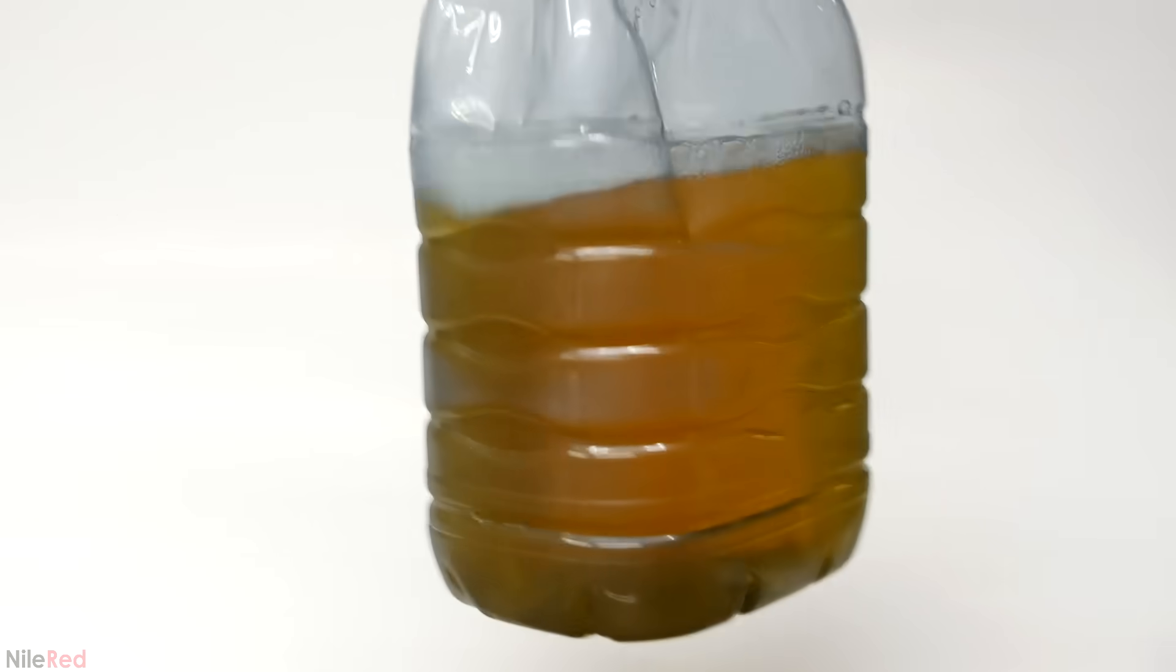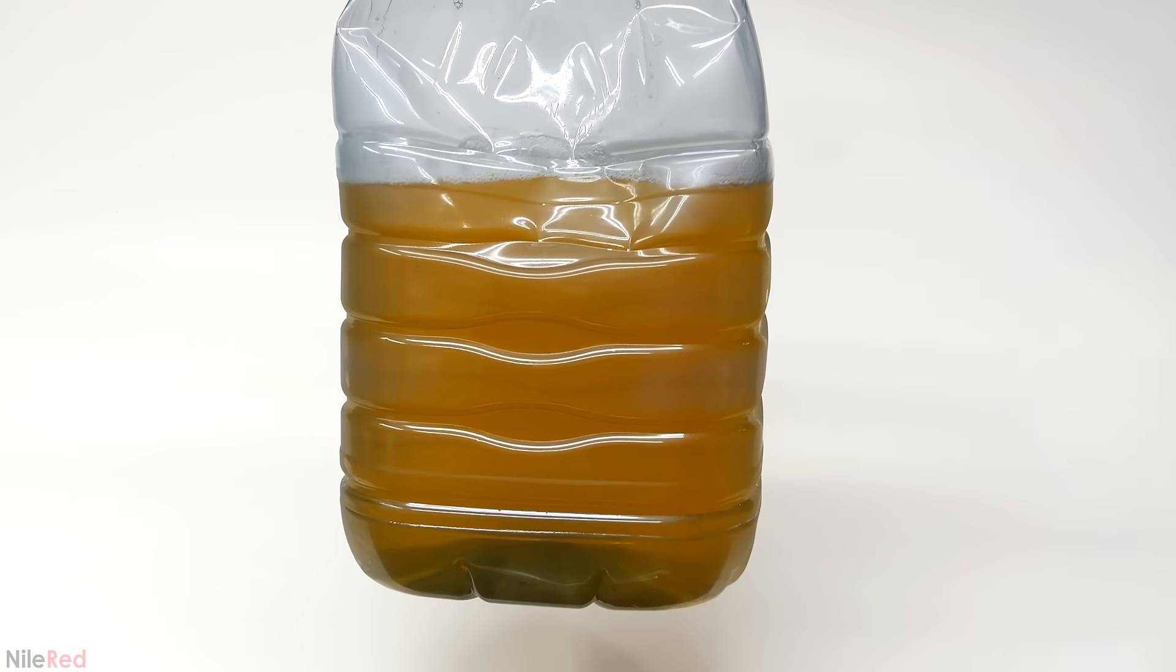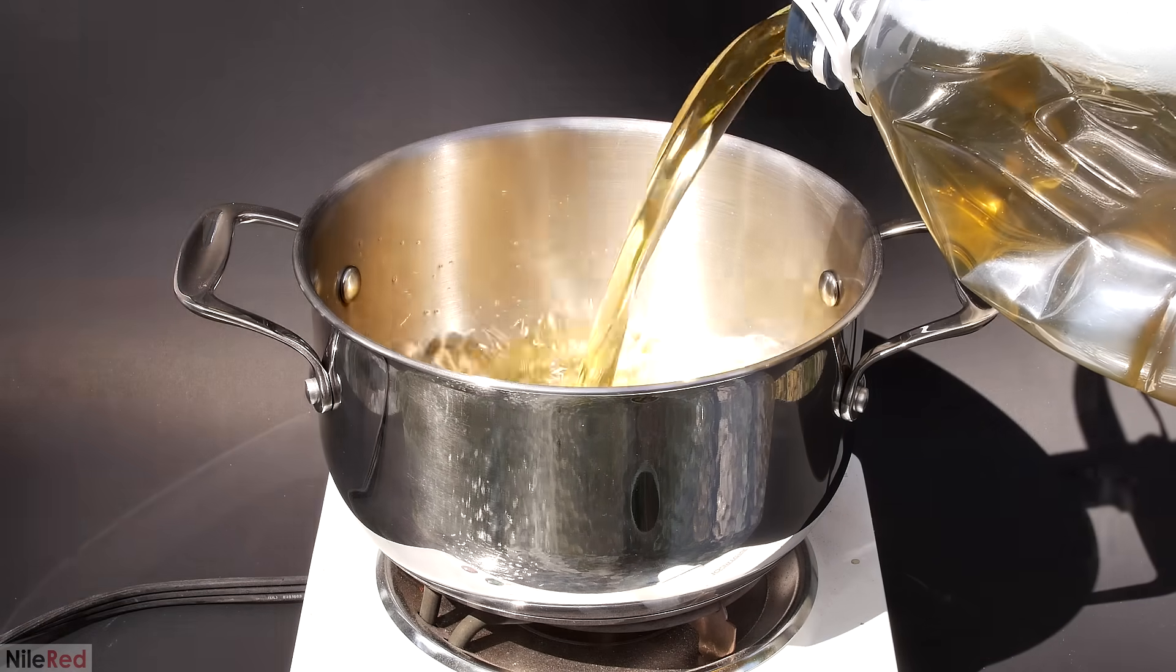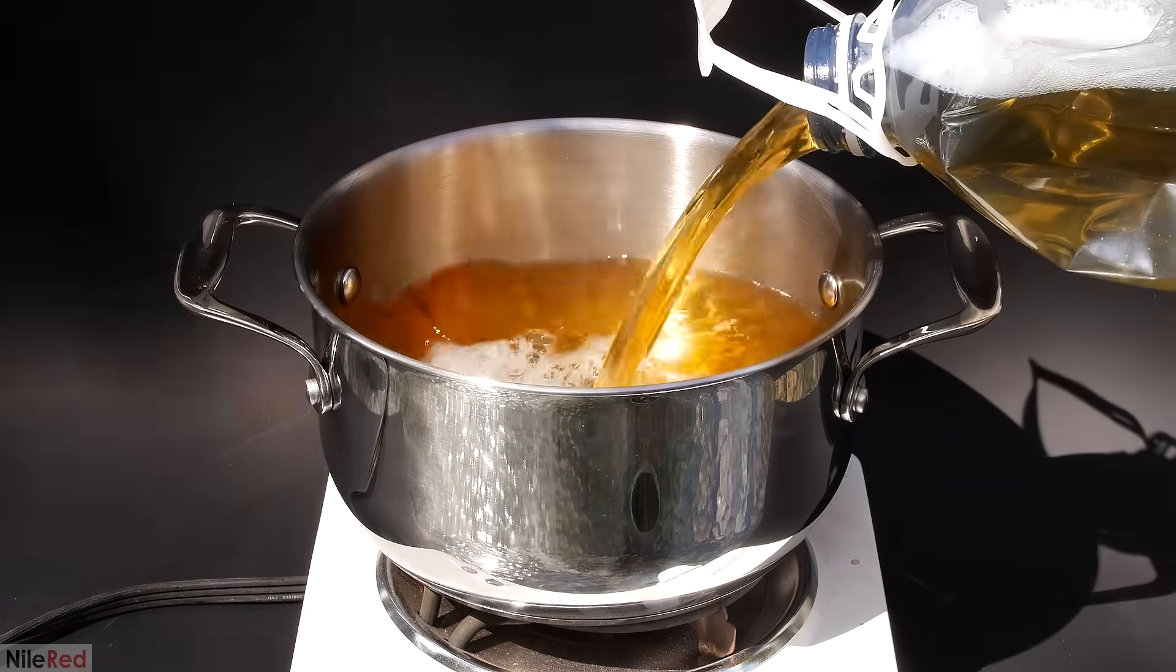Because I didn't really want my house to permanently smell like pee, this step had to be done outside. I picked up a large pot from Walmart, added all the pee, and then heated it up on a small electric burner.